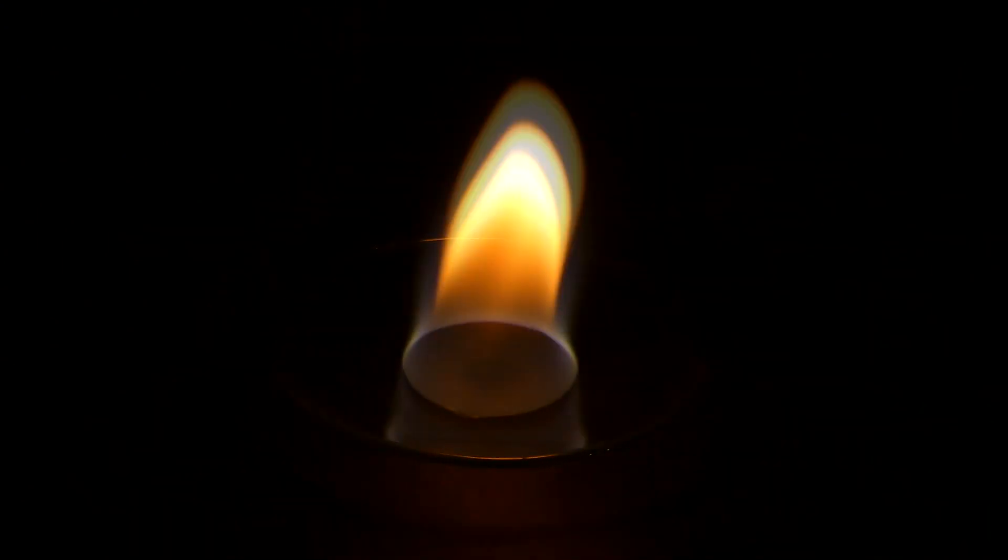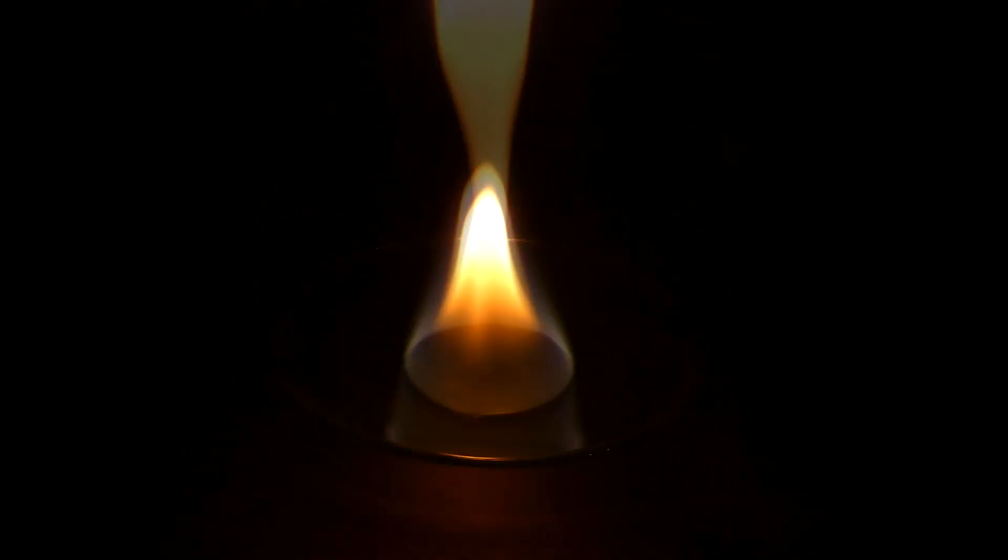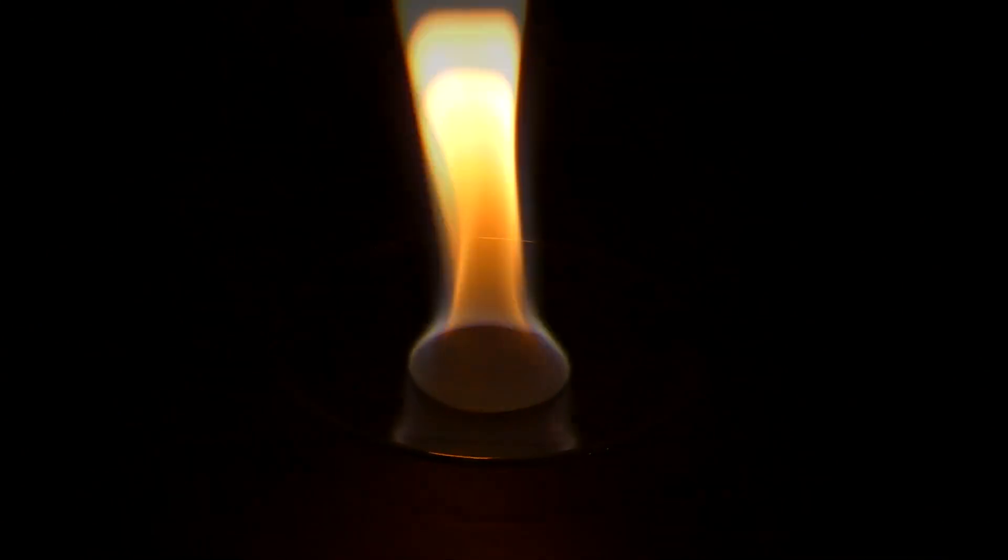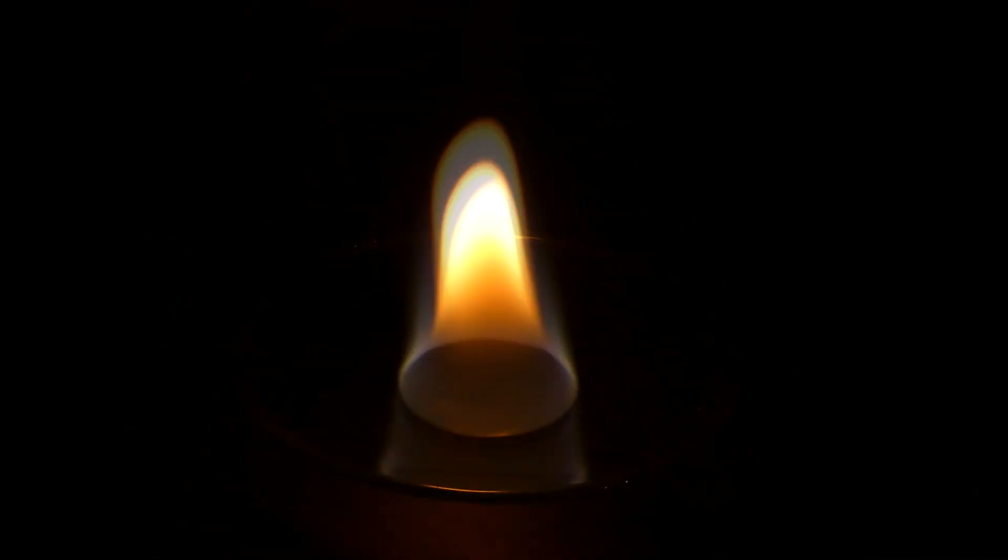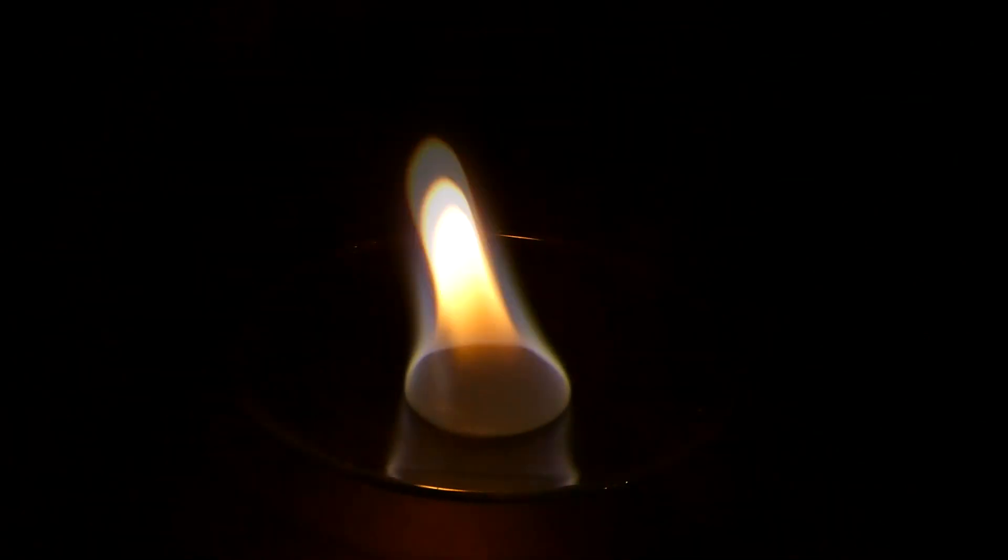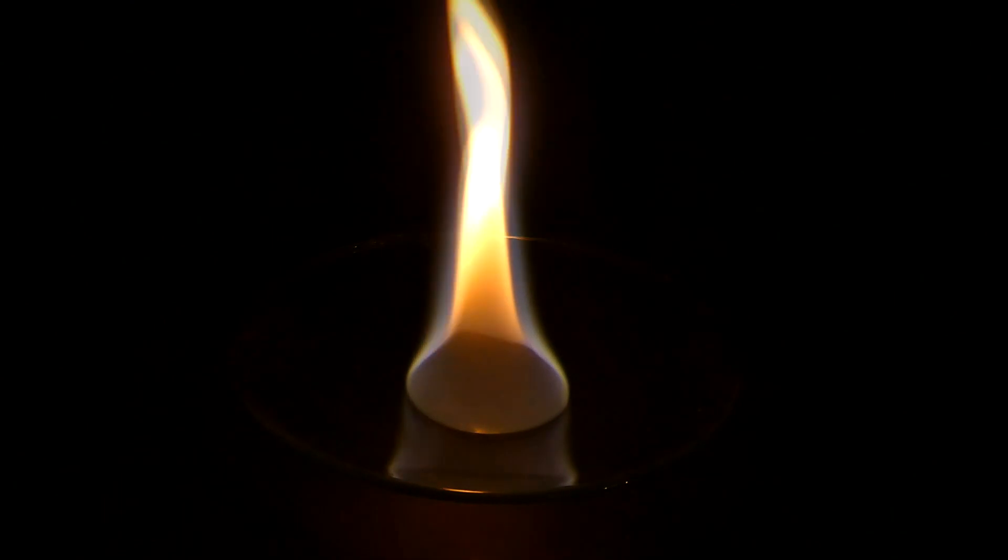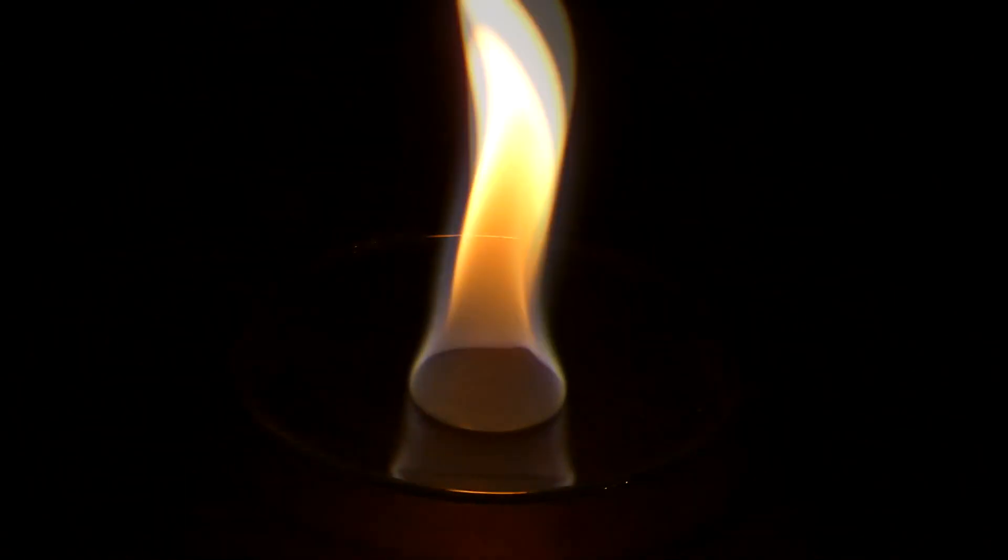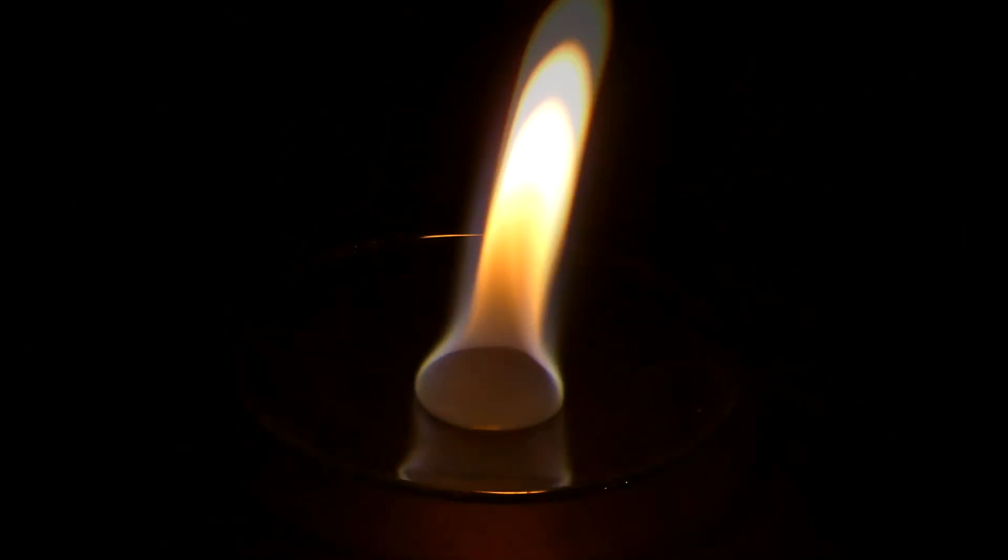At this point, I have run out of ideas to try, and started suspecting that the orange flame color was from some kind of sodium impurity that was dissolved in the isopropyl nitrite, because I didn't do the washing step. Anyway, while the flame test wasn't too spectacular, now let's move on to other applications of isopropyl nitrite.